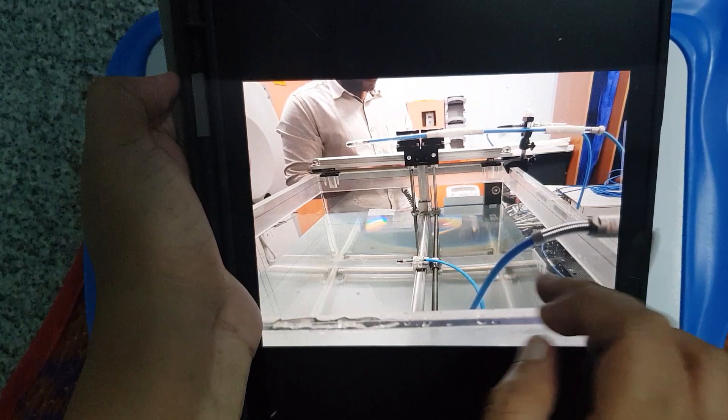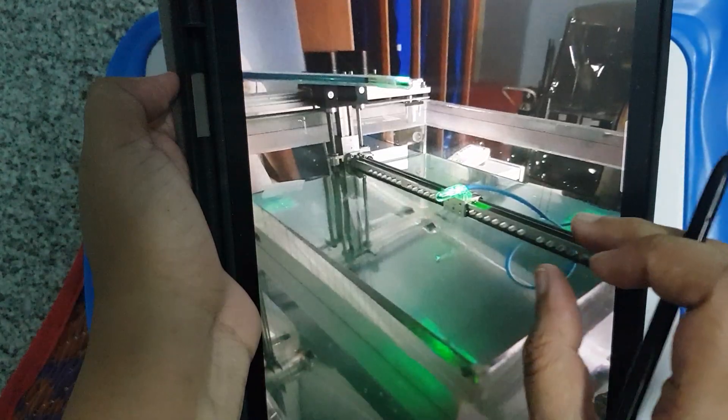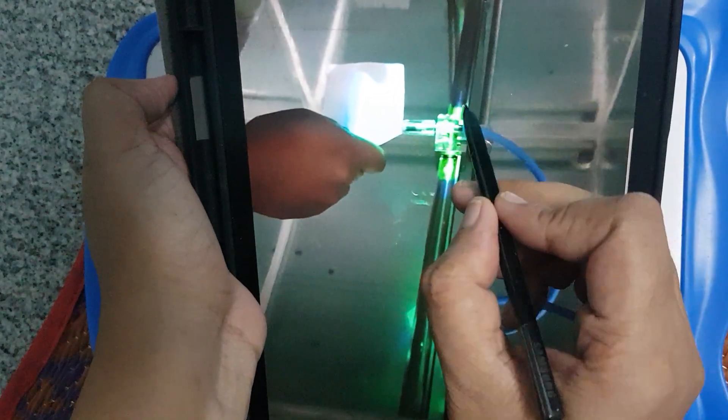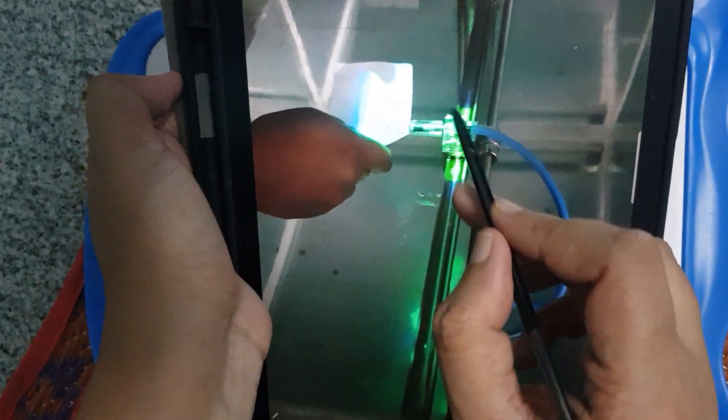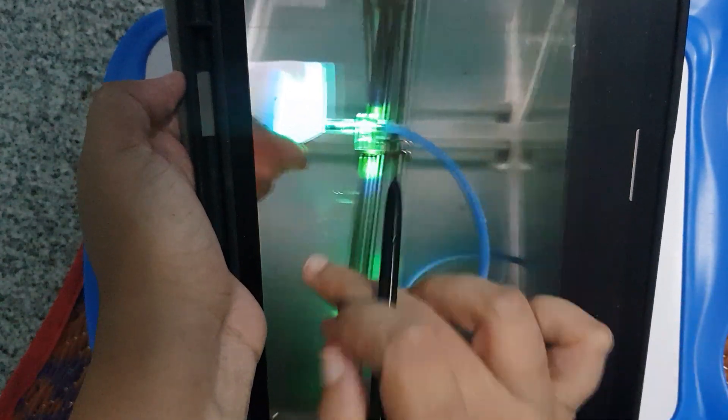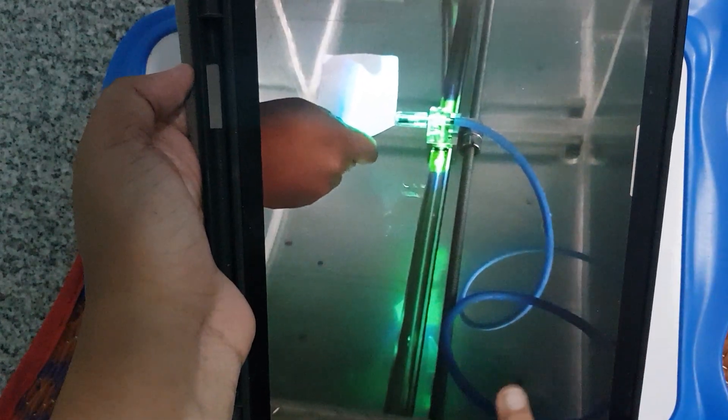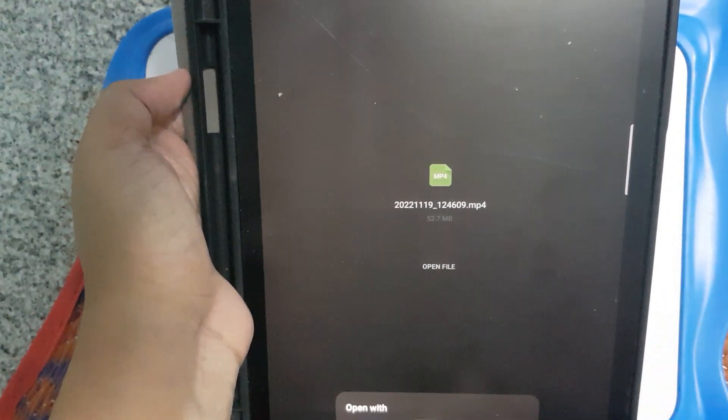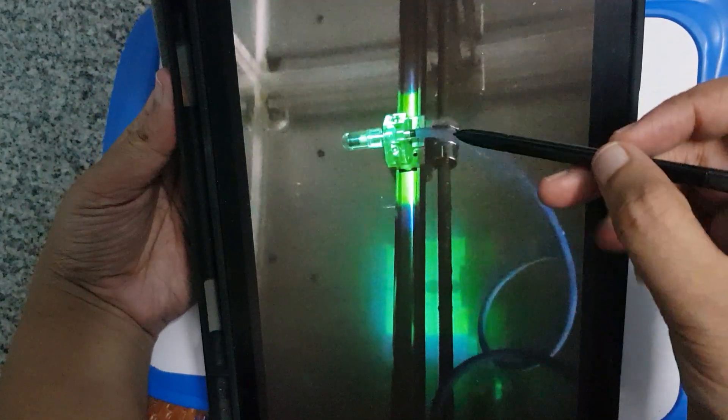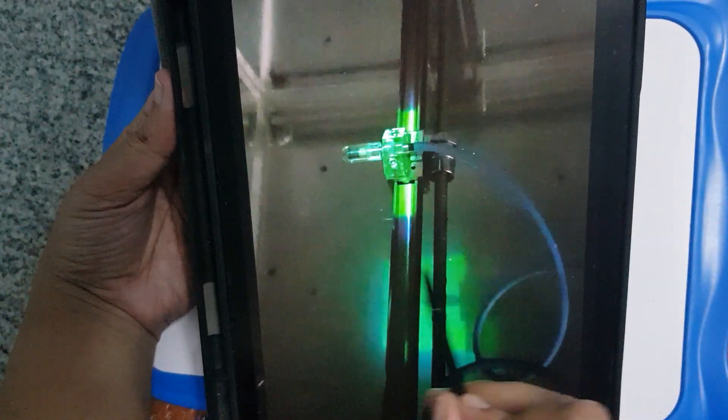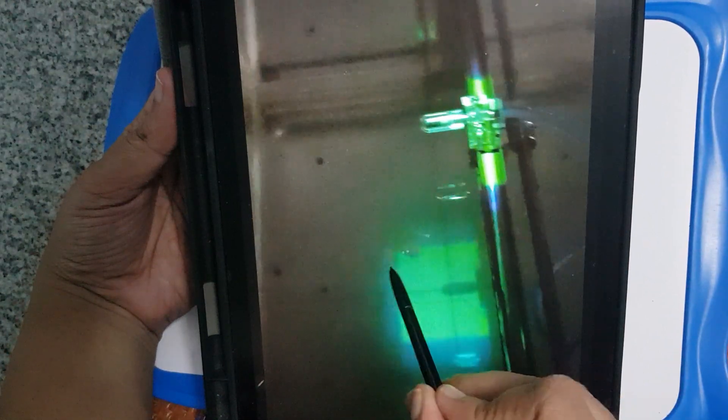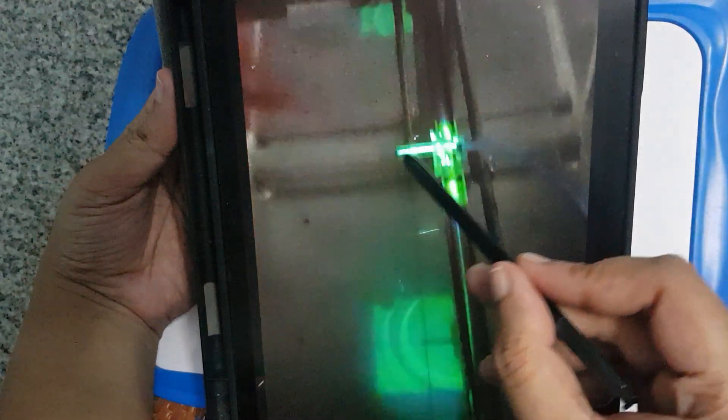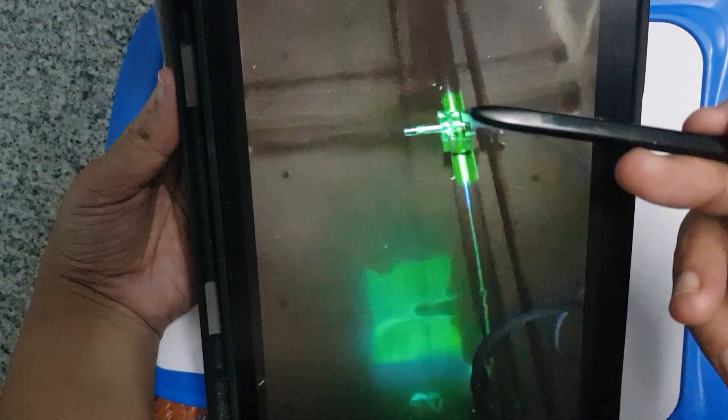For example, your 5 by 5 field is opened. So if you can see here, this is the field size. You can see the reflection over here, that is the field size. It is around I think 5 into 5 centimeter field size, and now they are removing the detector cap.